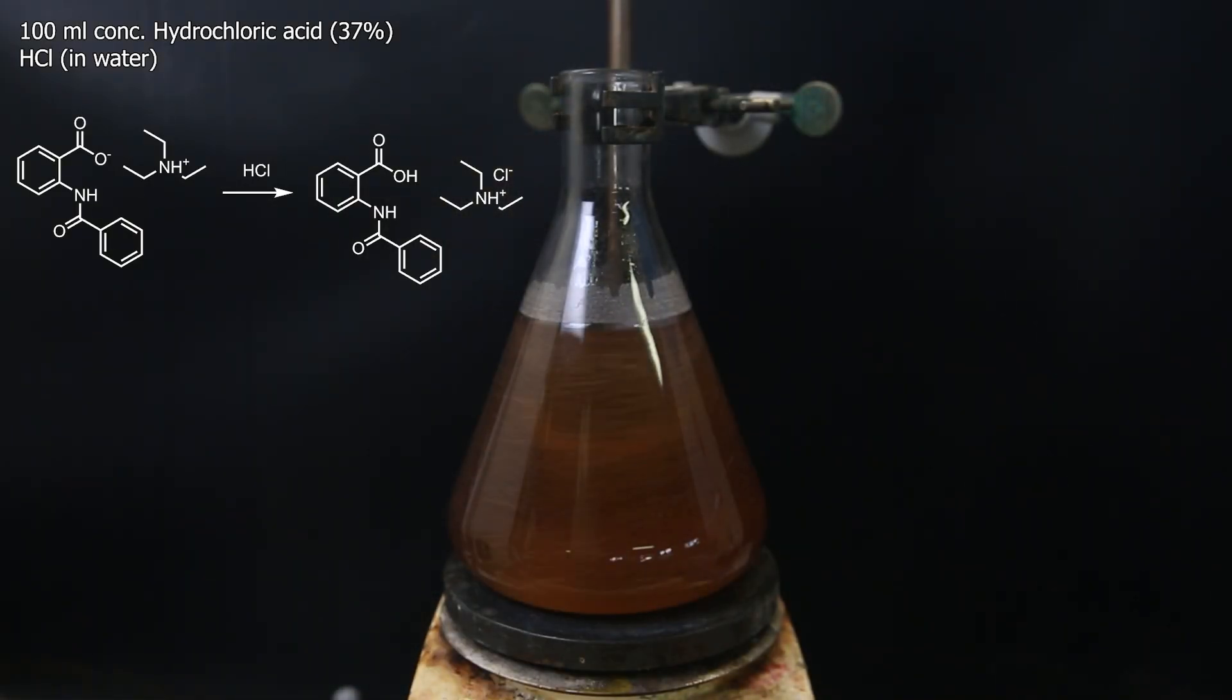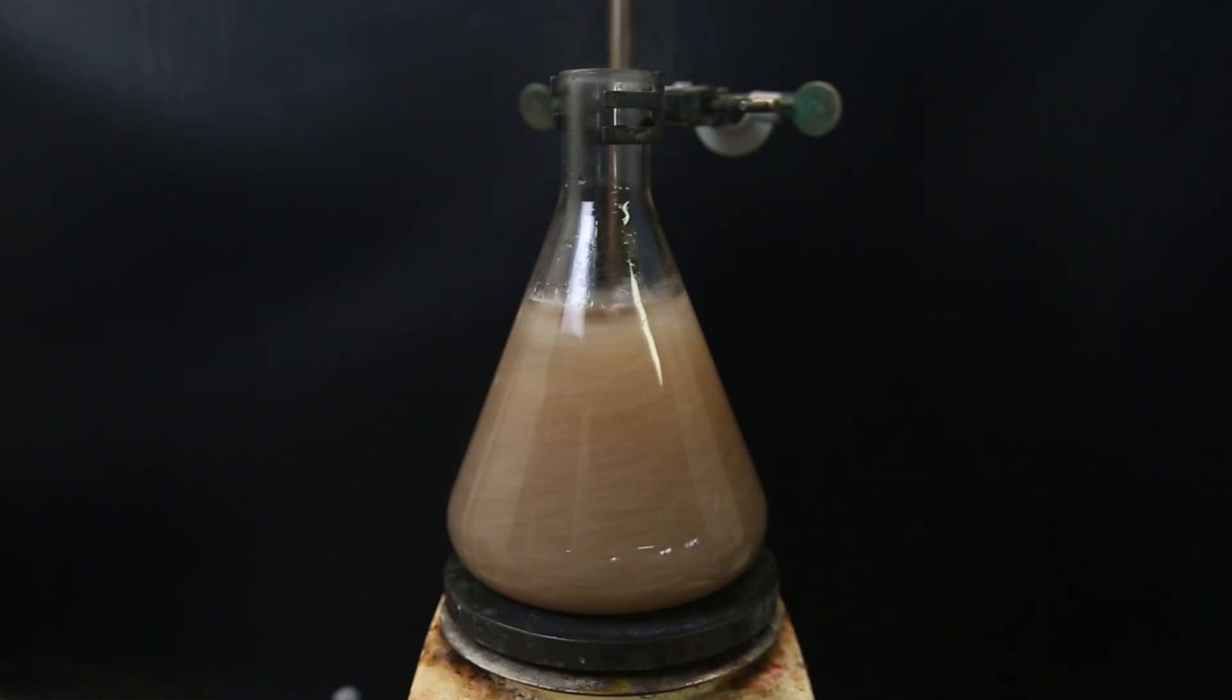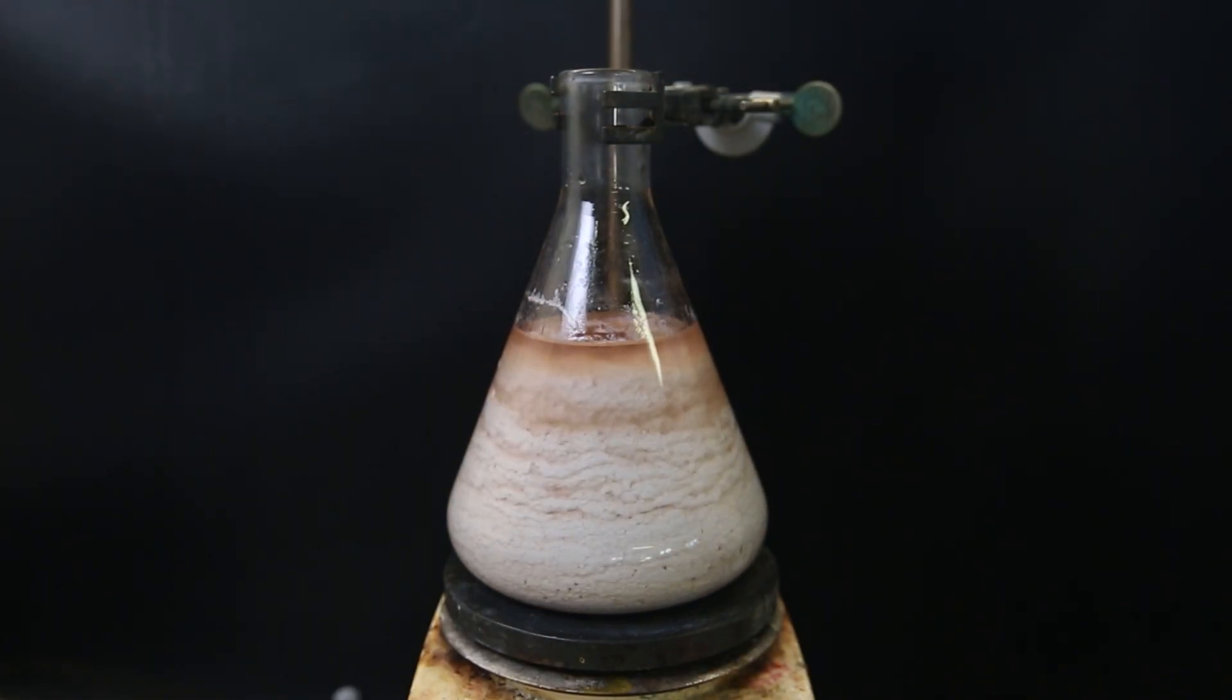Gradually, we see the product crash out, and the stir bar can no longer handle it. So I let it sit like this for an hour to make sure it's complete.